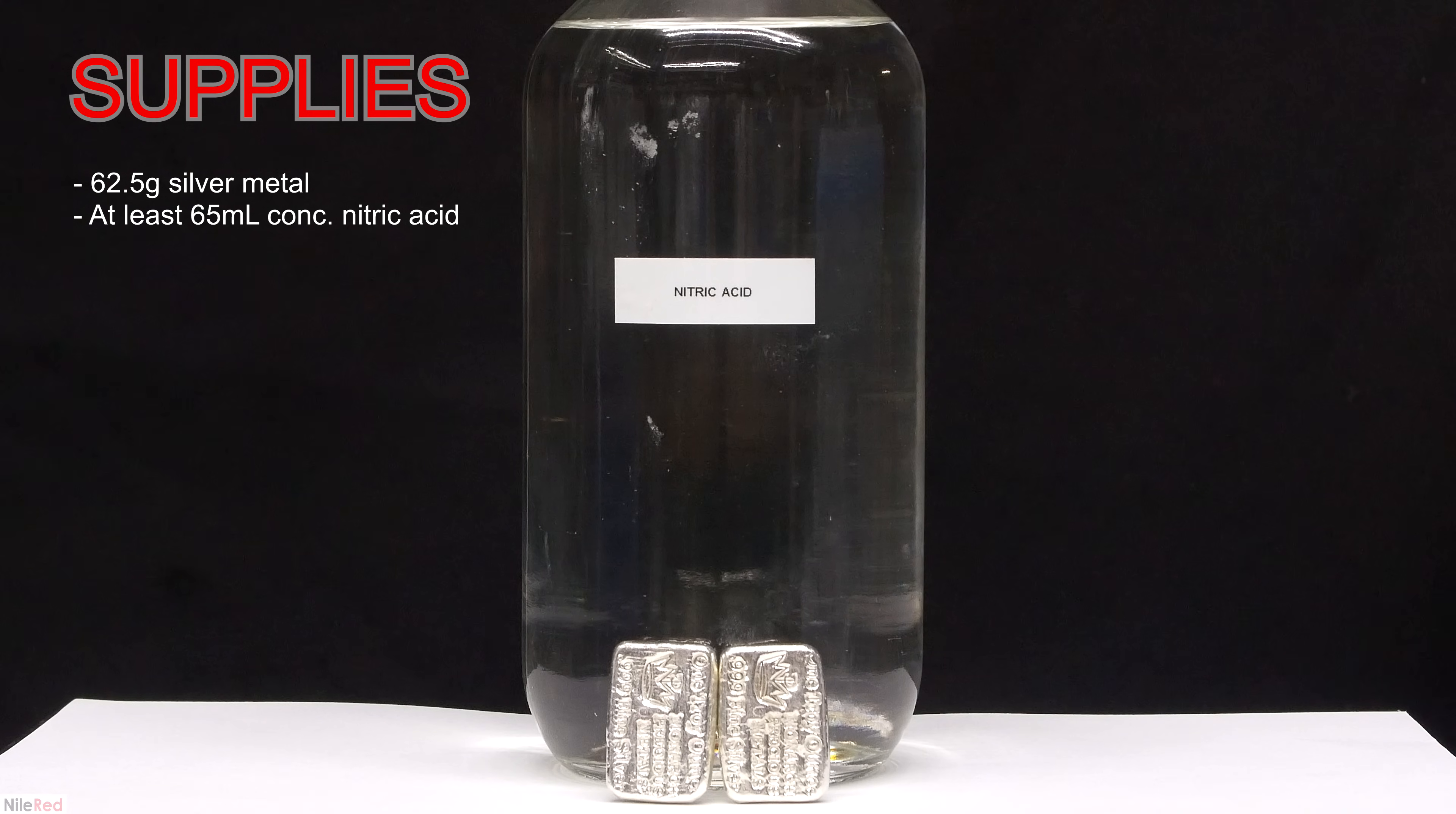In terms of chemicals, all we need for this preparation is silver metal and some concentrated nitric acid. Both of the silver pieces you see here weigh about 31.25 grams, which is a little bit above a troy ounce. For the nitric acid, I found a decent amount to use was a little bit more than a milliliter per gram of silver. So to react the 62.5 grams of silver, I used about 65 milliliters of the nitric acid.